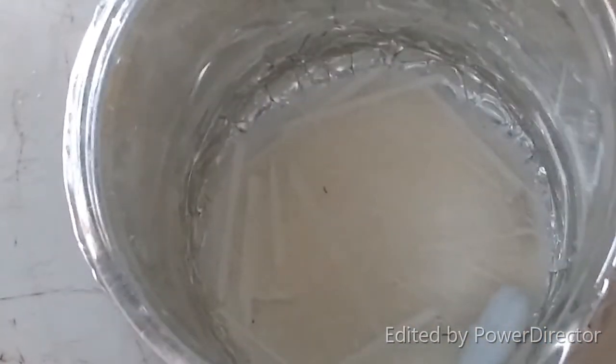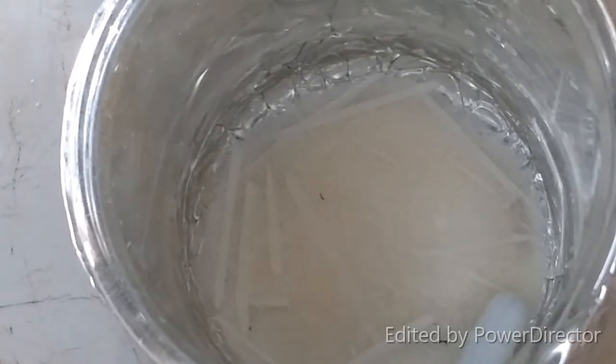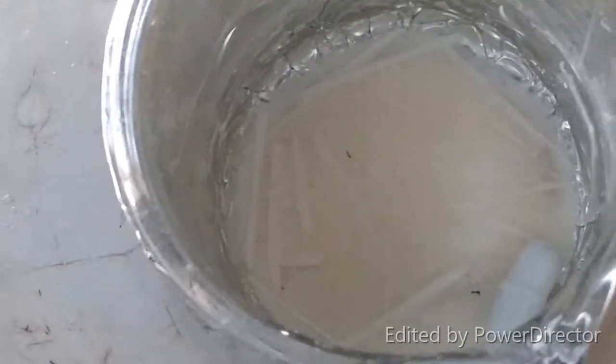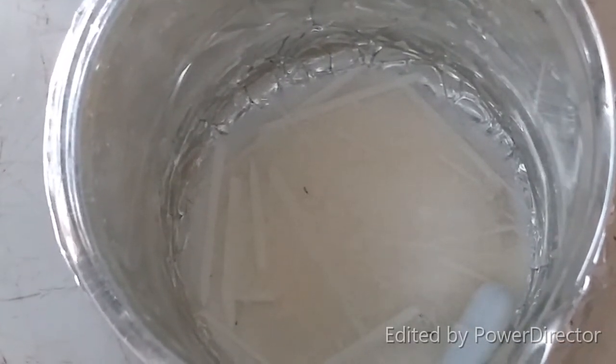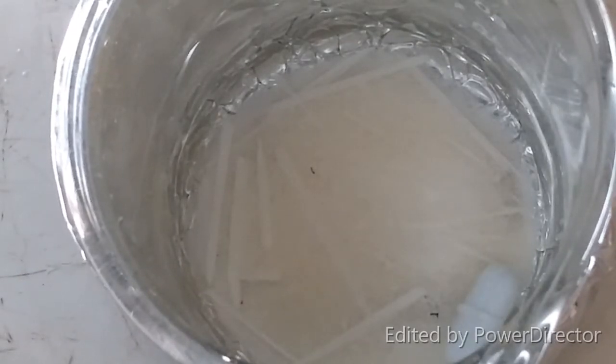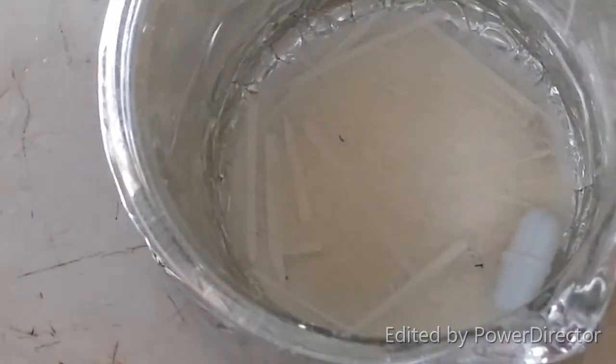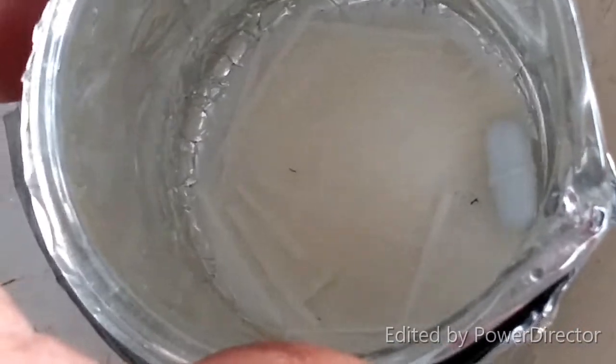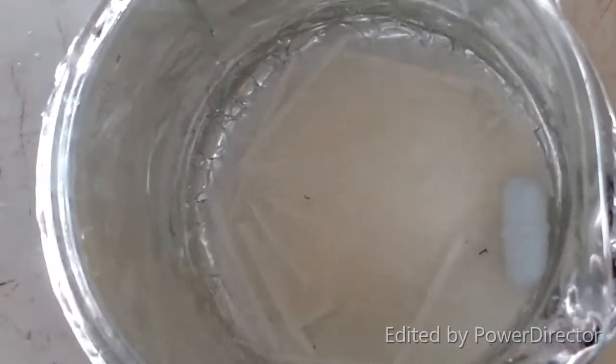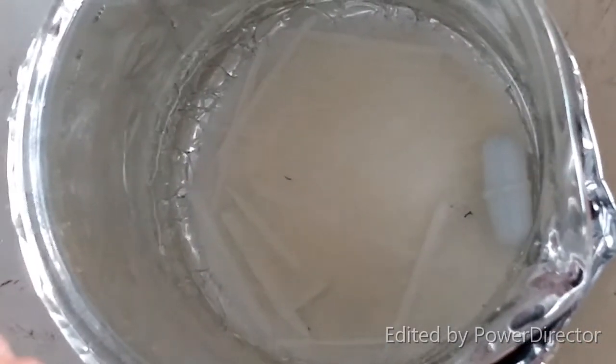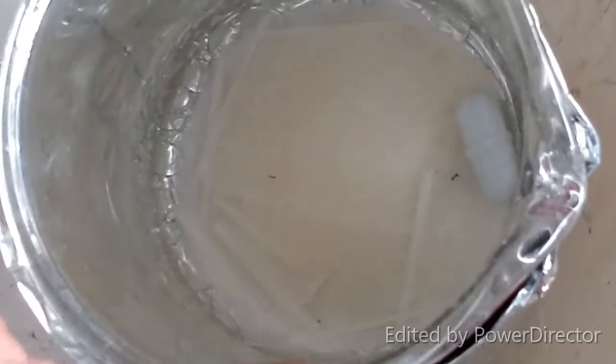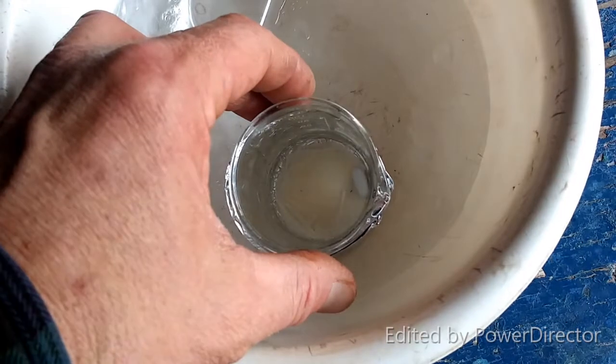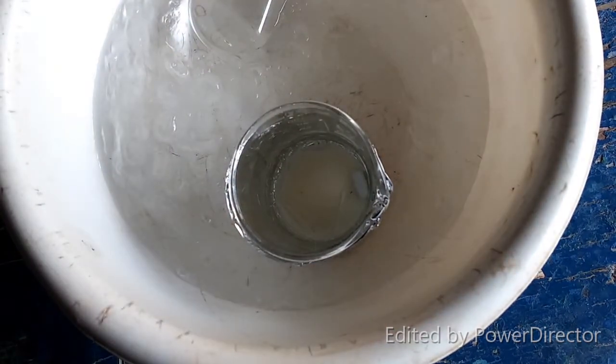I'm scared it's going to tip over in there, so let me show you guys. Look at that - we have some beautiful thick needles of silver chlorate in there. That is fucking gorgeous, it is awesome. I really wish I could have filmed this crystallizing in time lapse. You can see it forms great big needles that are stellated, meaning they tend to originate from a single point. Very cool stuff. Unfortunately we have to filter these very cool crystals, which will destroy them.